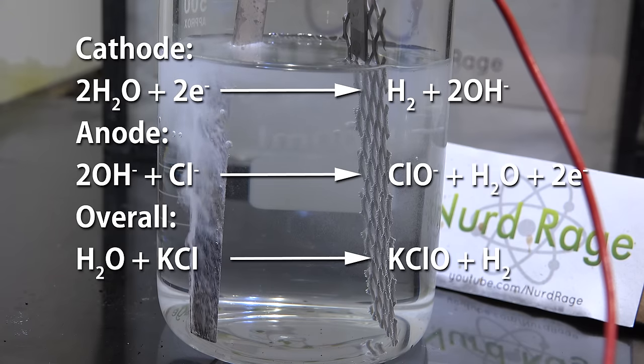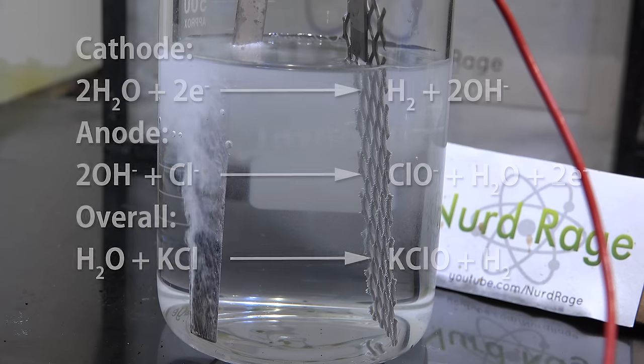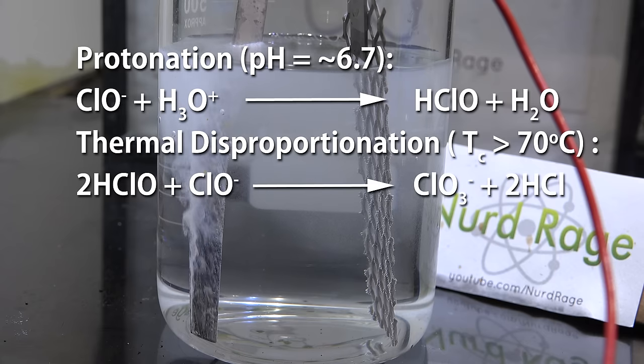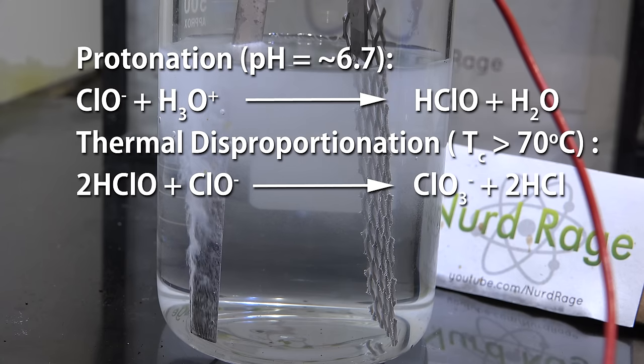Rather than producing potassium chlorate directly, what this really does is create potassium hypochlorite first. In order for this to make potassium chlorate the pH must be maintained at around 6.7 to protonate some of the hypochlorite into hypochlorous acid. Then if the cell were run at a higher temperature, say above 70 celsius, the ions would disproportionate into potassium chloride and potassium chlorate. In a basic cell this doesn't happen because not only are we just running at room temperature, but the pH actually drifts away from ideal very quickly.